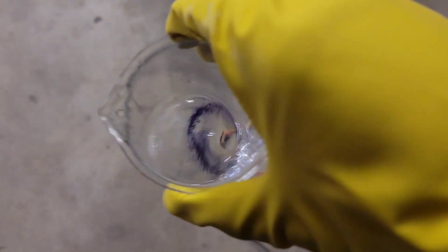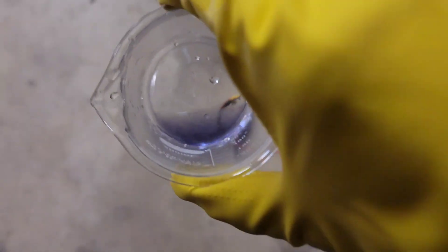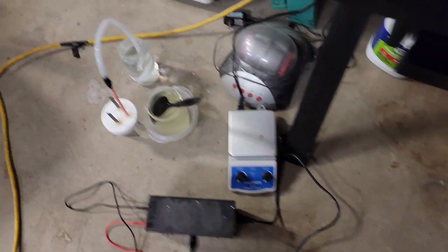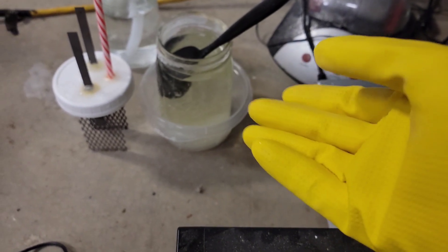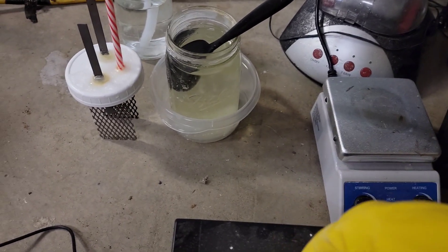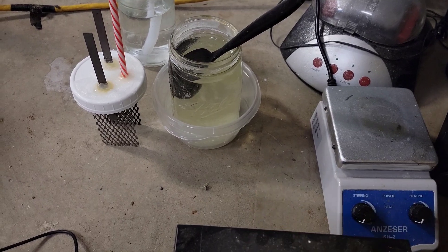Okay, so it's kind of hard to see. It definitely looks very purple to me. I don't know why the camera's not quite catching it. It looks blue on camera, I can't describe it, but it's definitely purple for me. Maybe I'll take a picture and put it on the video. But since we finally reached purple now, we can go ahead and cut this and we can move on to the chlorate reclamation steps and I'll put the graph on the map to show kind of where we are in the chlorate production.